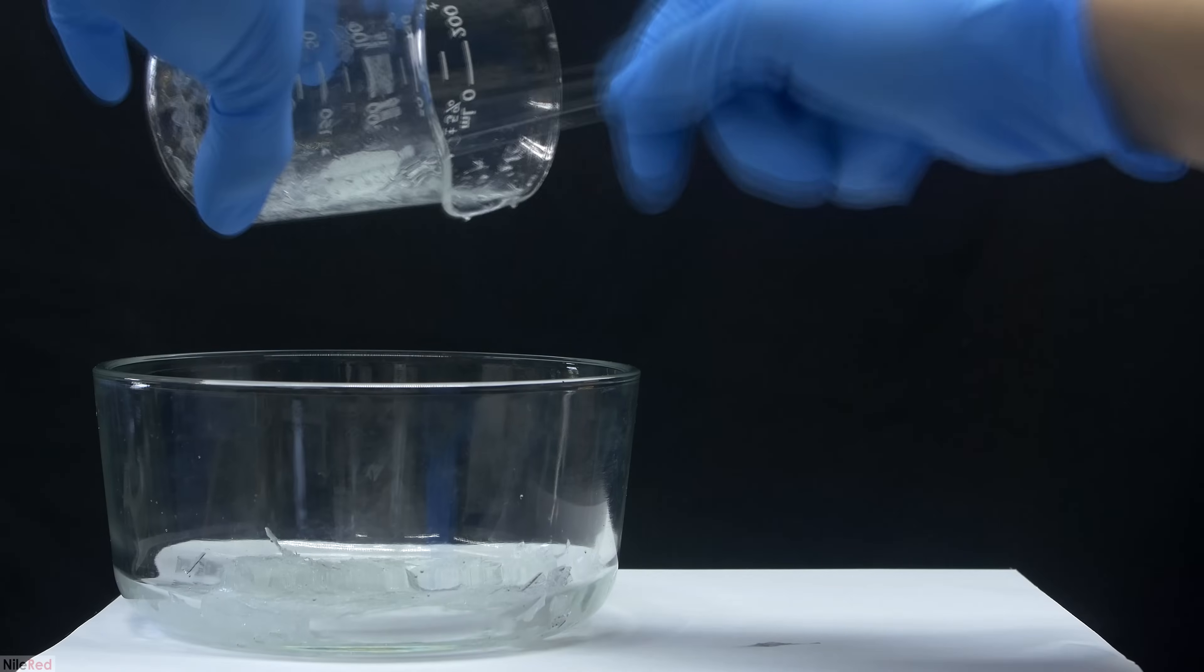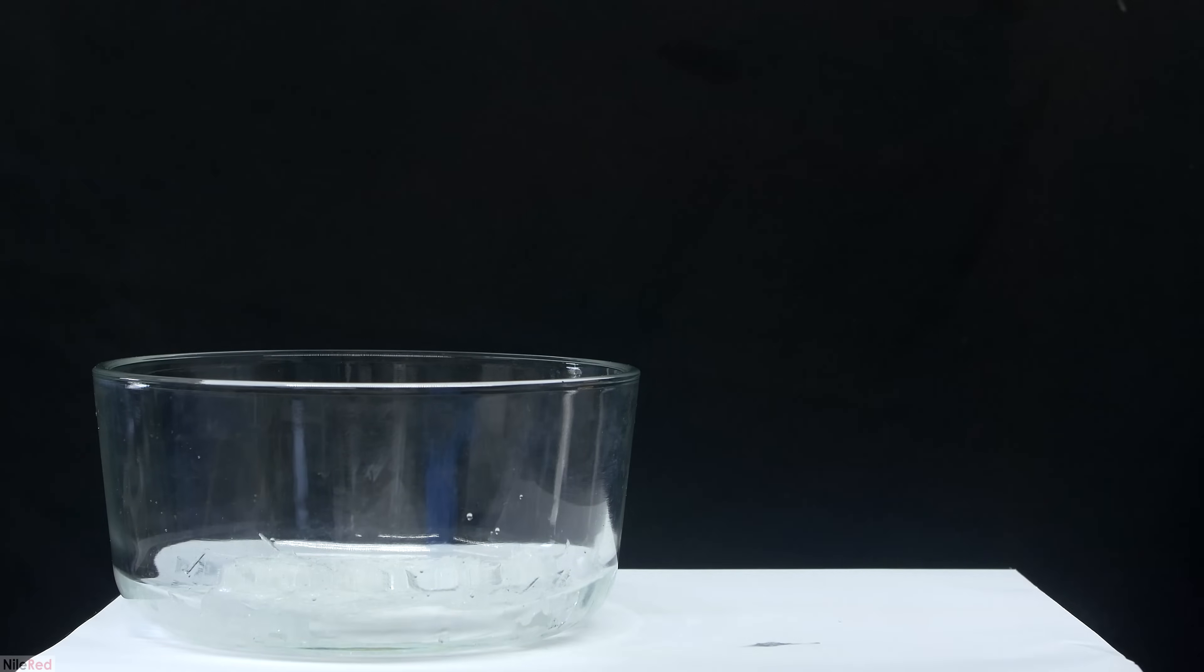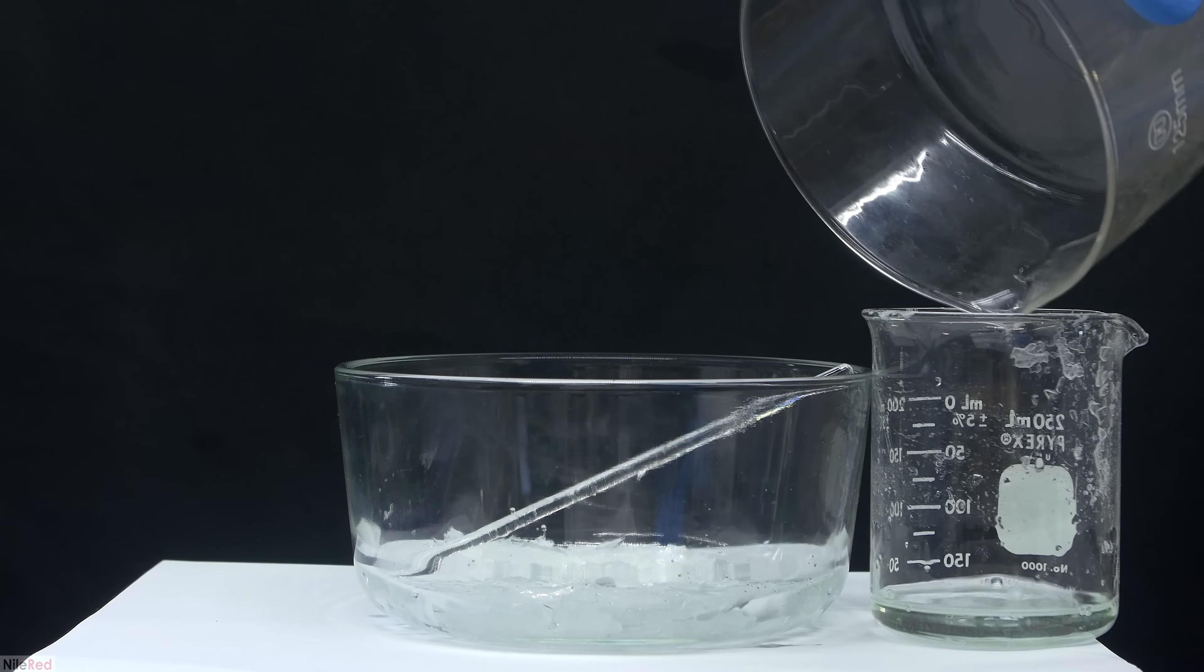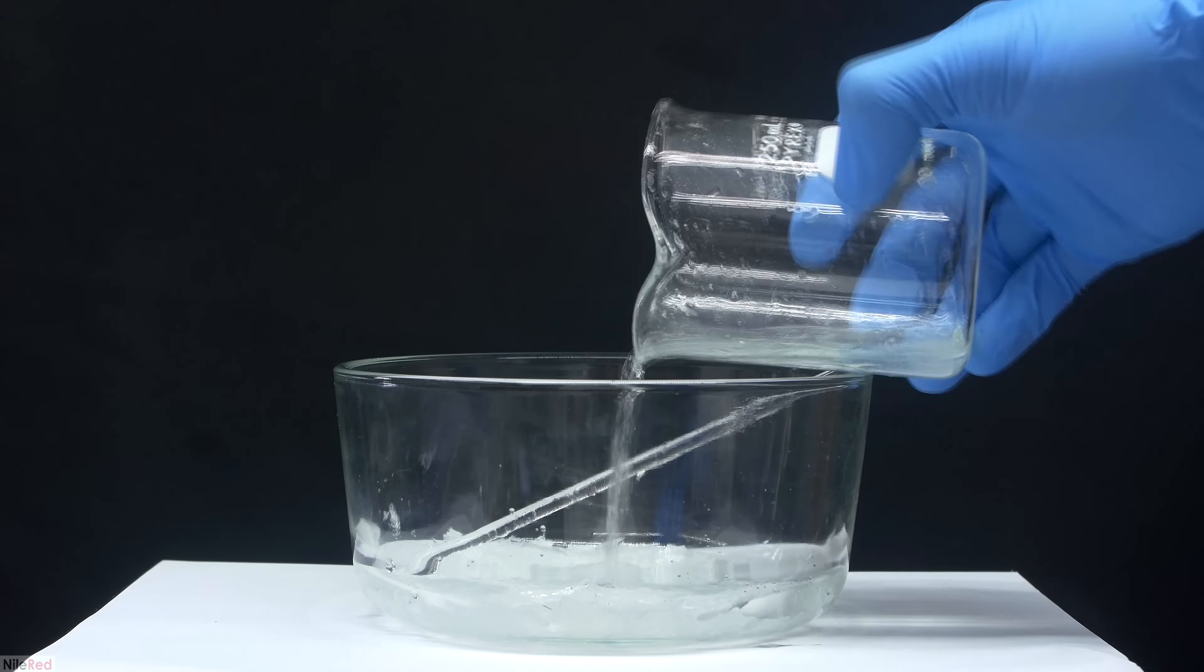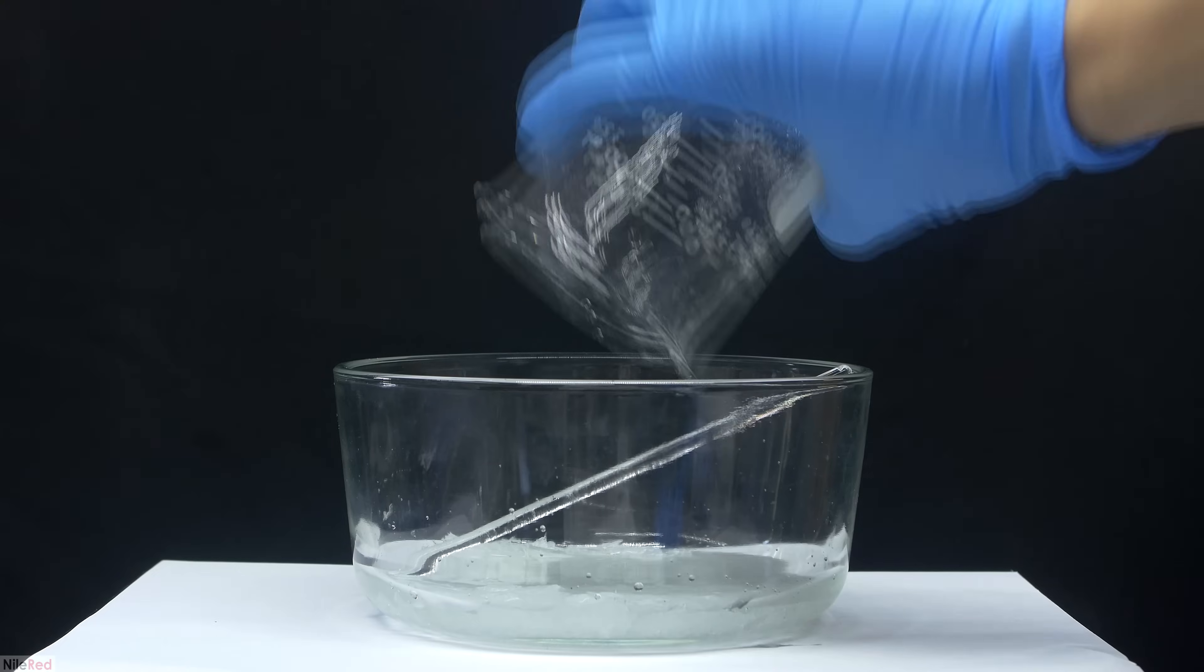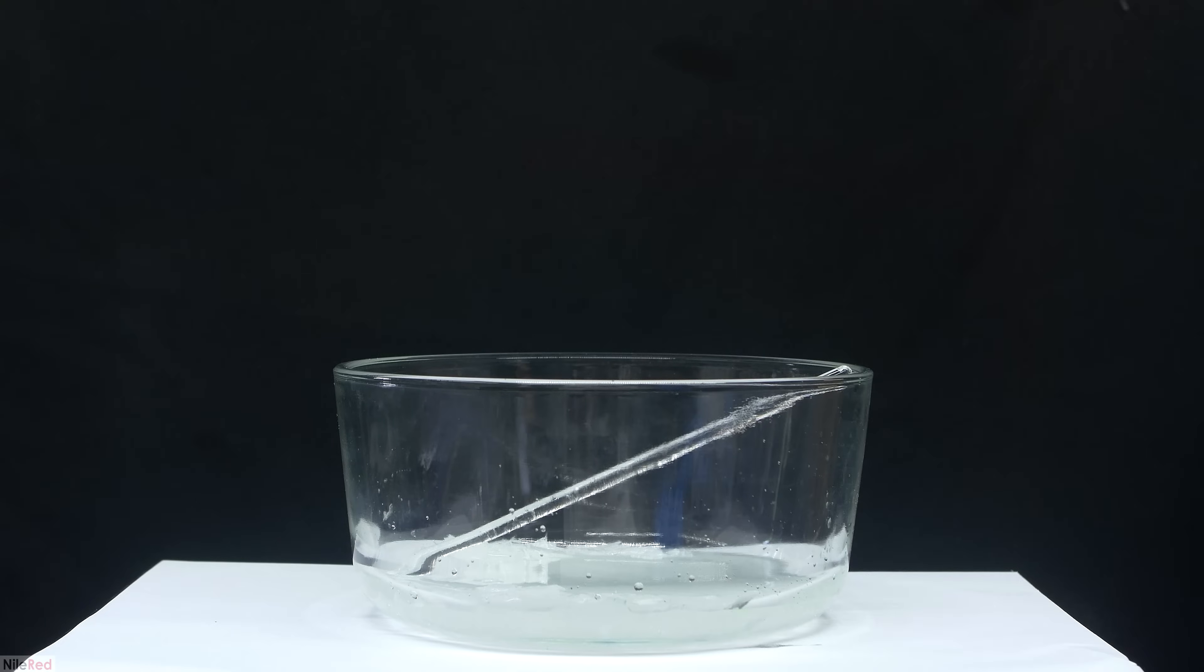The crystals were then dumped out into a glass bowl. After I dumped out all of the crystals, I looked at the beaker and it seemed like there was still quite a bit left over. To wash out the beaker, I used the water that we had decanted out earlier.